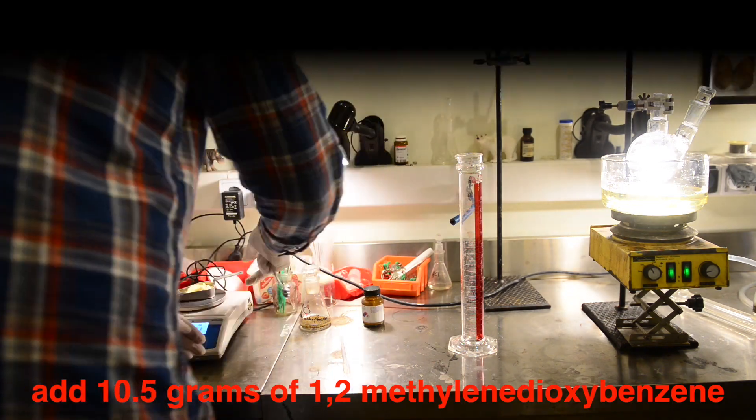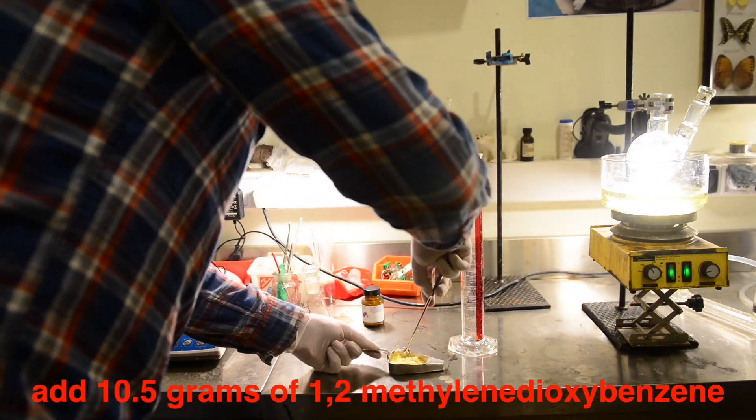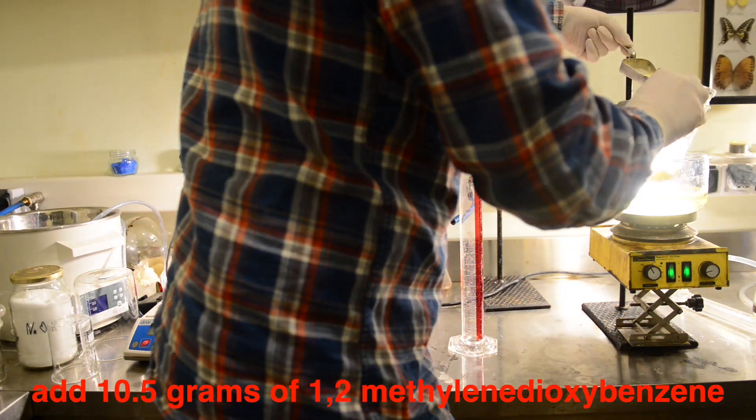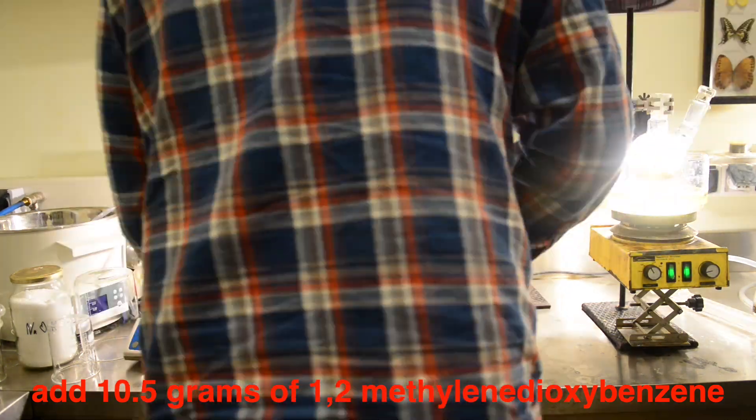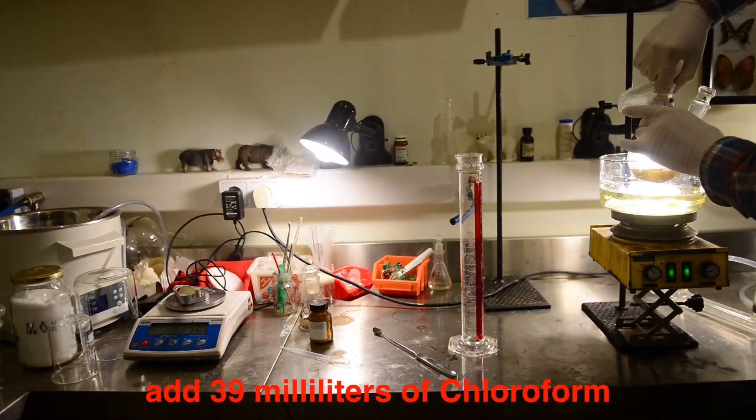Let's get started. This time we are changing the addition order. We place 10.5 grams of 1,2-methylenedioxybenzene at first, followed by 39 milliliters of chloroform.